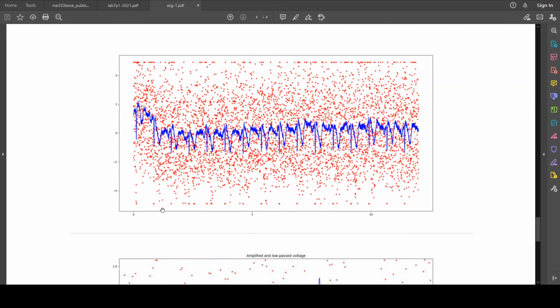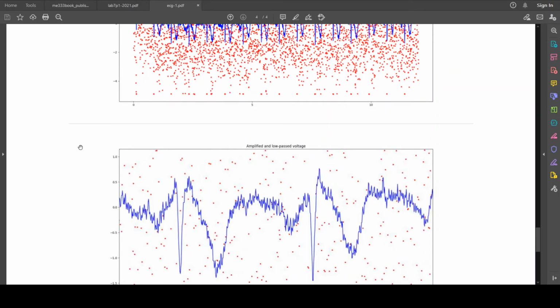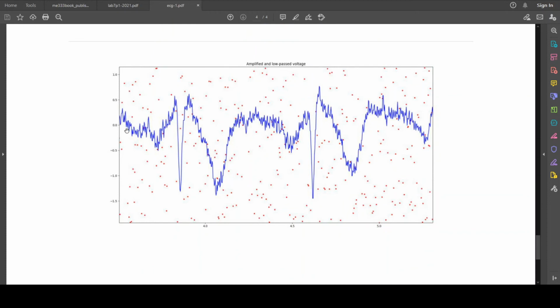I don't really want to hit plus and minus 5 volts. But I tried to make it as big as I could, because then after the low pass, I got this blue signal. And if I zoom in on two of these spikes, this is inverted. So probably if I flip the electrodes to my left and right hand, or really the wires that go to them. But we see here's a P, Q, R, S, and then this big fat one is T. So again, here's a P, a Q, an R, an S, and a big fat T.